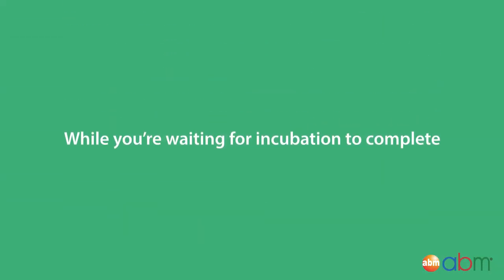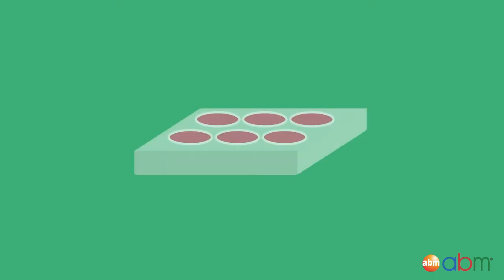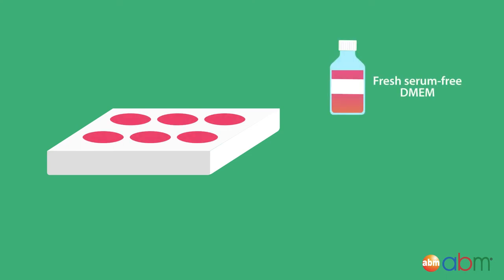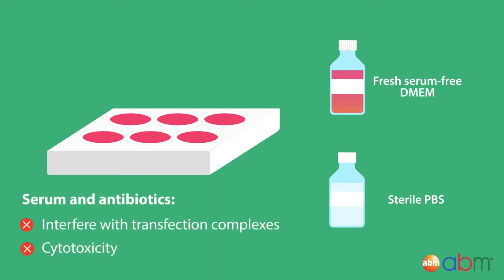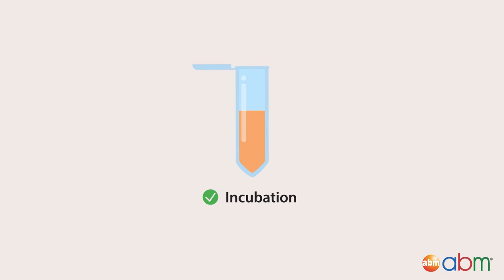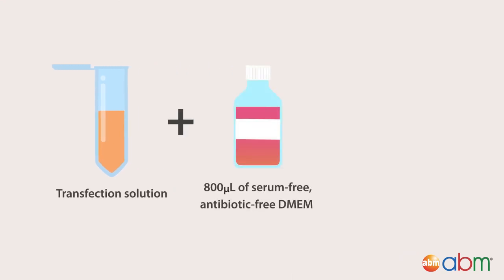While you're waiting for incubation to complete, aspirate the old growth media from the 6-well plates and gently wash the cells with fresh serum-free DMEM or sterile PBS to remove any serum and antibiotics that could interfere with the formation of transfection complexes and increase cytotoxicity. Once incubation is complete, add 800 microliters of serum-free, antibiotic-free DMEM to the transfection solution.